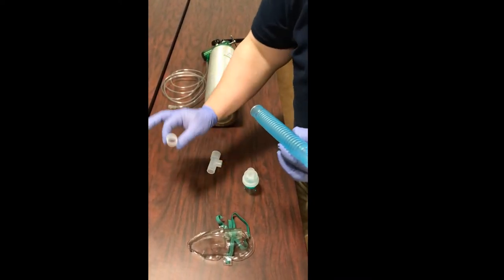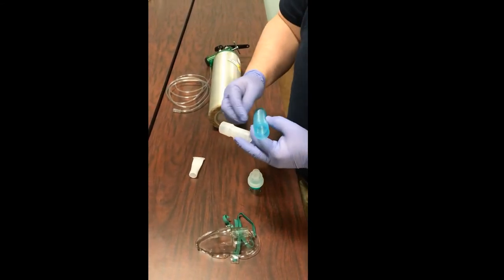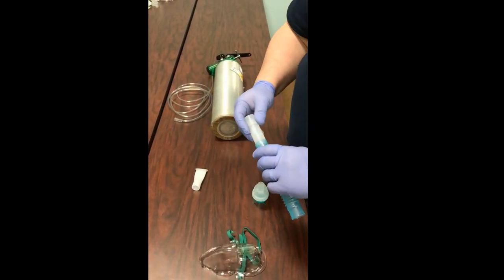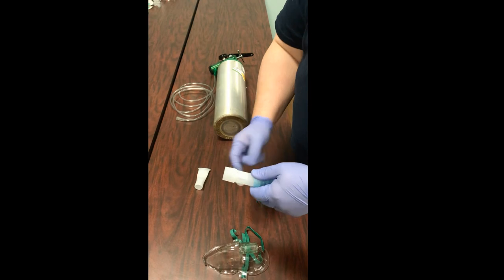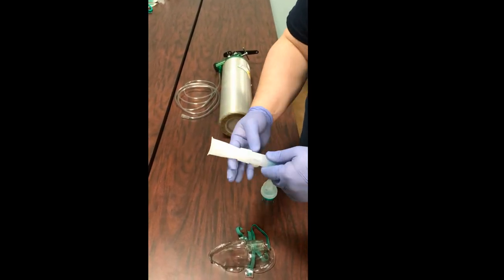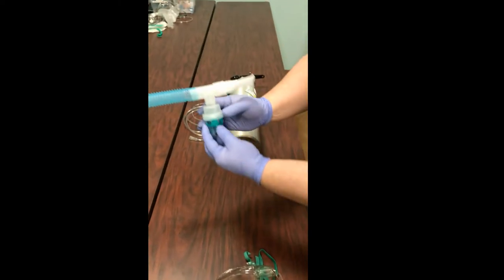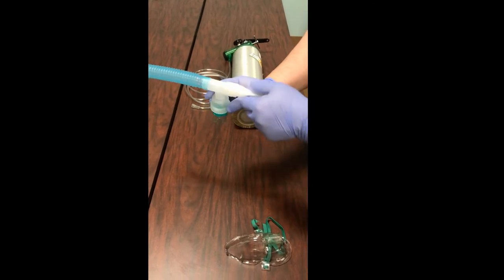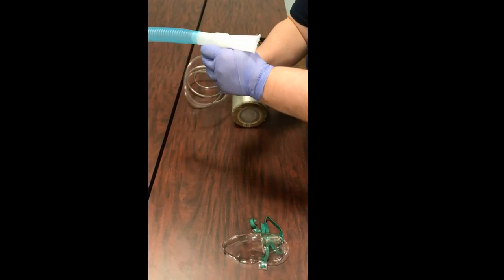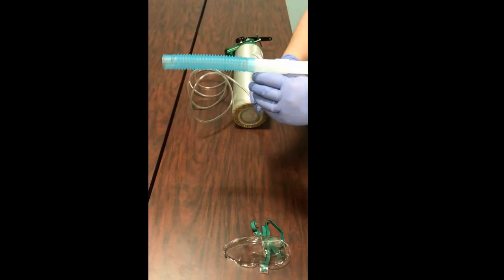For the handheld device, we want a piece of corrugated tubing, a mouthpiece, and what we call a T-piece because it looks like a T. The corrugated tubing slides right into the T-piece. The mouthpiece is the part that goes in the mouth. We then attach our chamber, and this is how the complete handheld device looks.